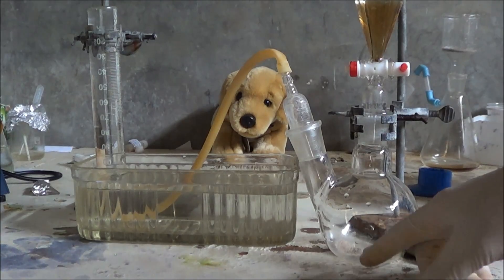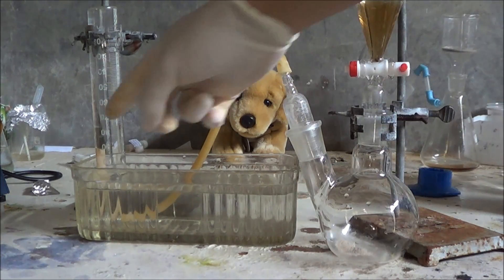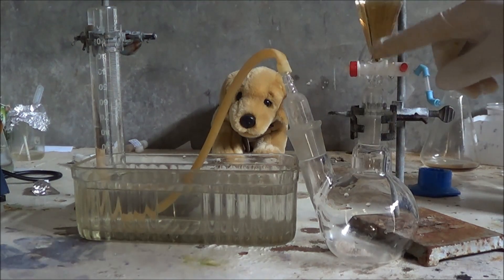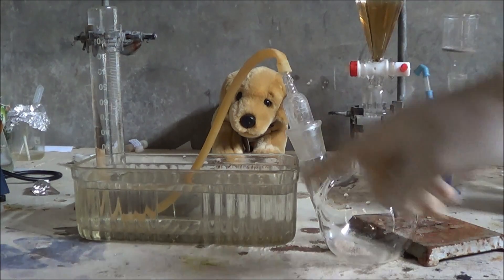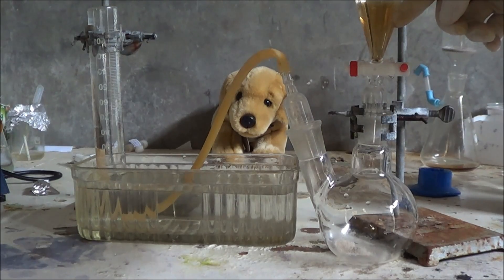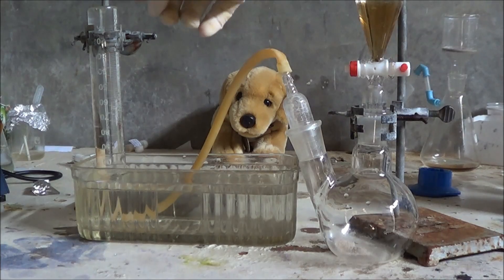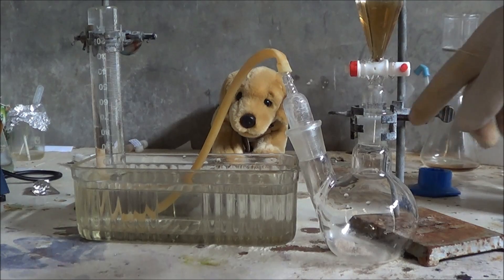Okay, so we've got the half a gram in here. The acid's going to come down, and we're going to bubble the gas into here. This solution is going to displace some air, so we're going to get, this is 27 mils in here. So we're going to displace 27 mils here, and any extra is due to carbon dioxide formation.